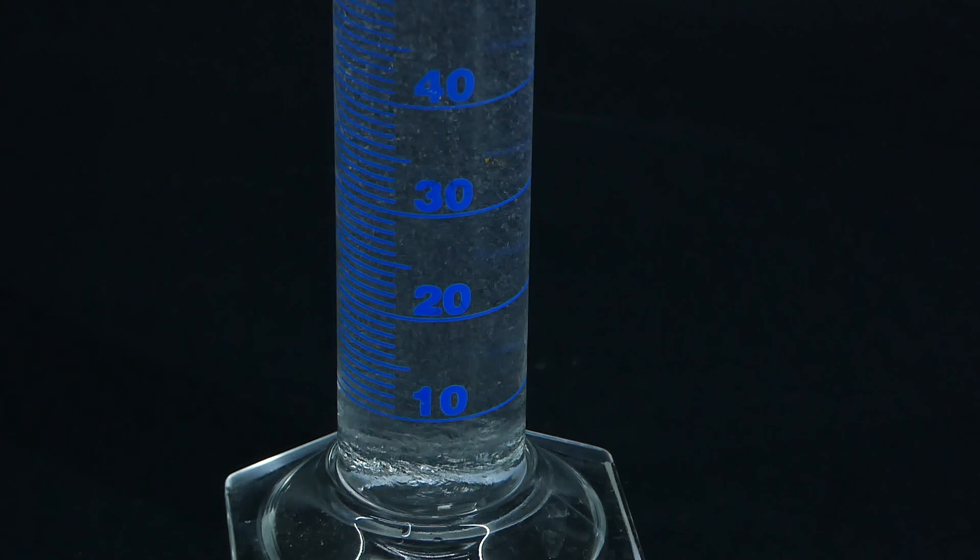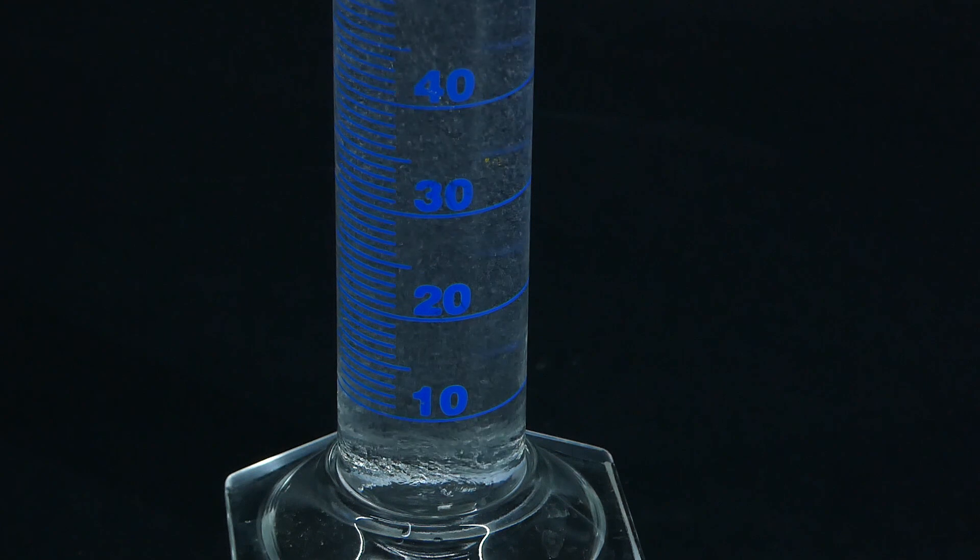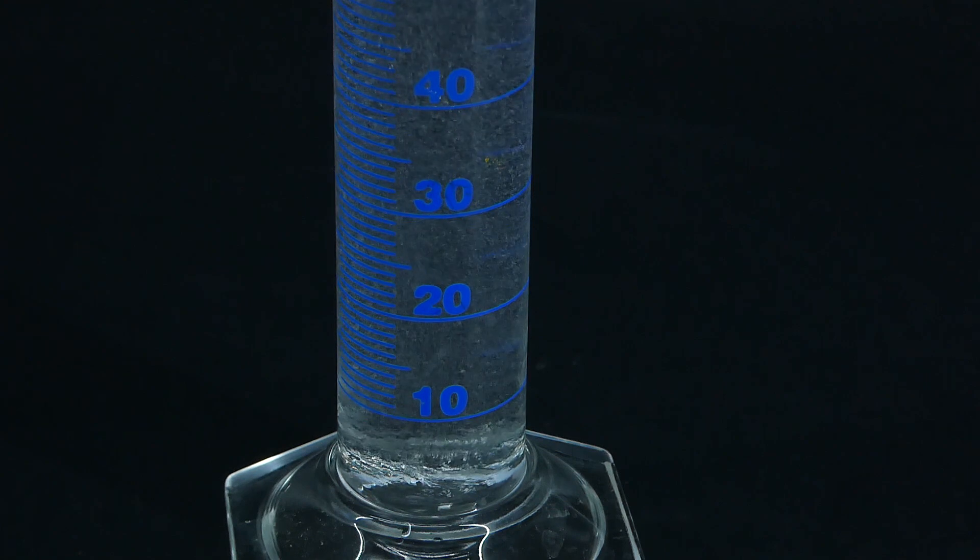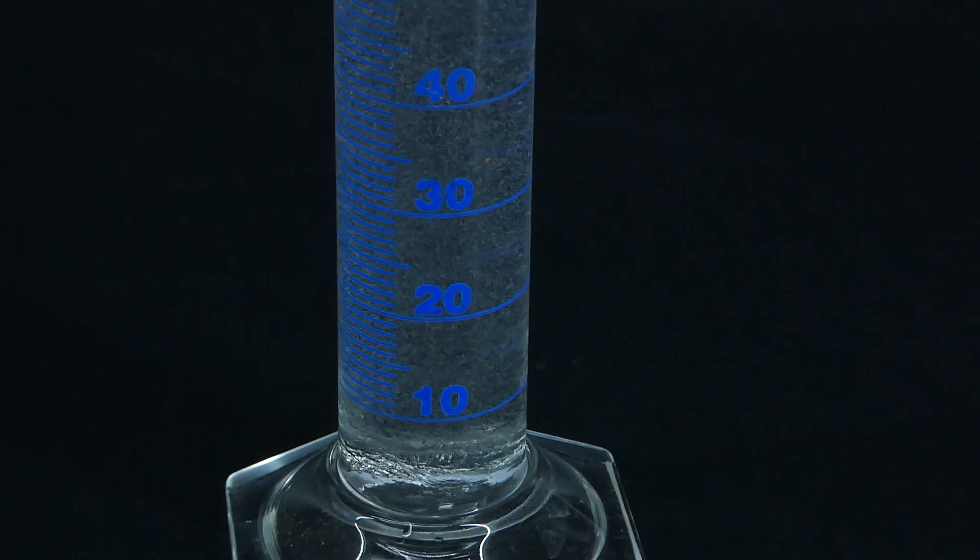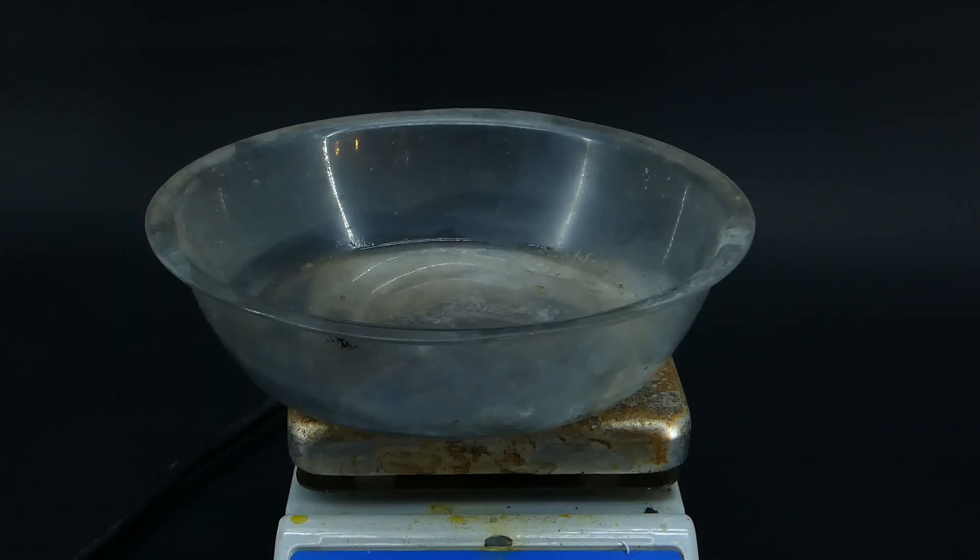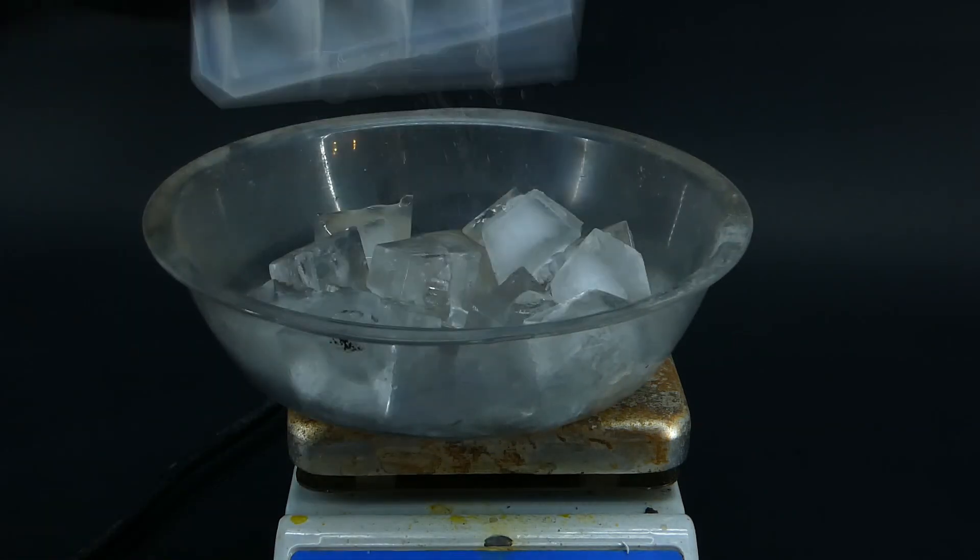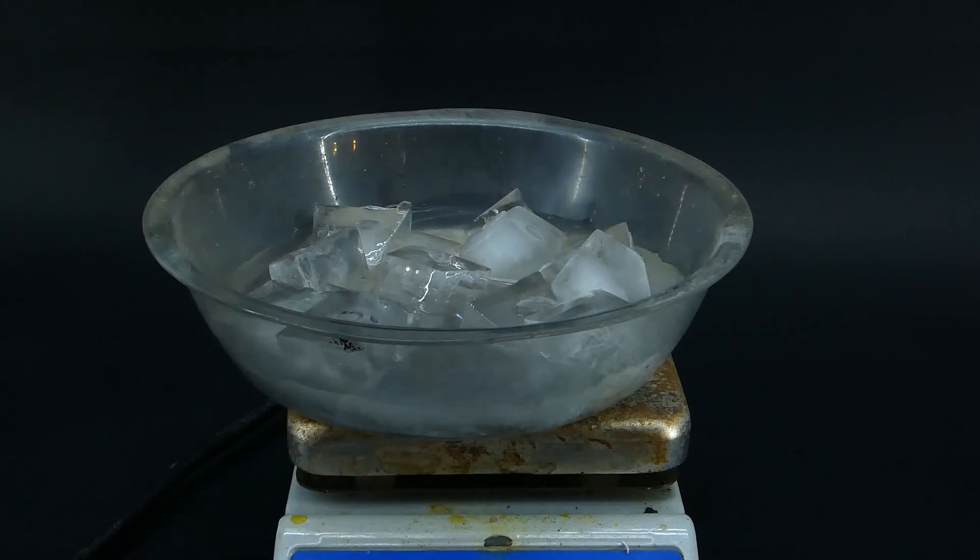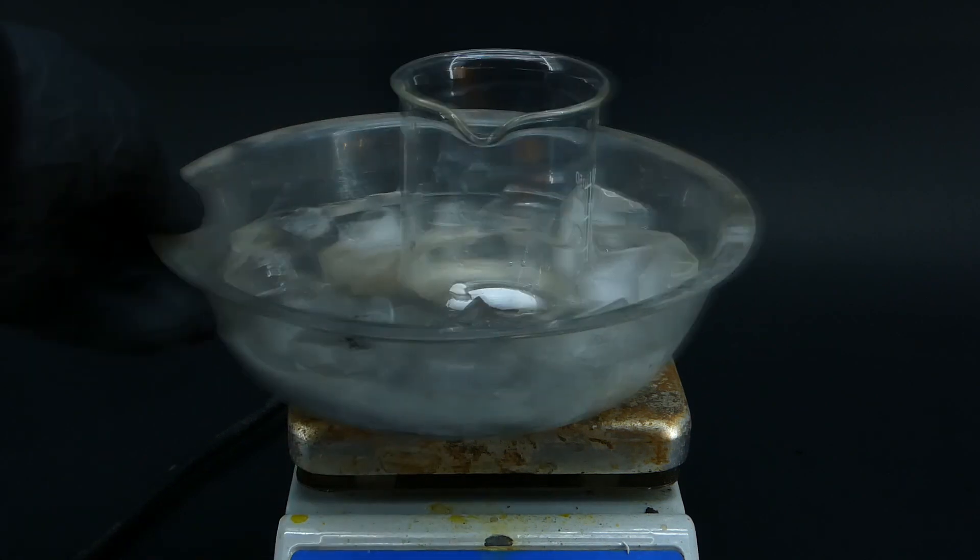Also guys, never pour water directly into concentrated acid, and instead do it the other way around. Here it is not a problem, since the hydrochloric acid is already a 34% solution in water. After combining the ingredients, I poured them into a beaker in an ice bath with stirring. The ice bath and stirring are not necessary, but again, the reaction works much better with them.